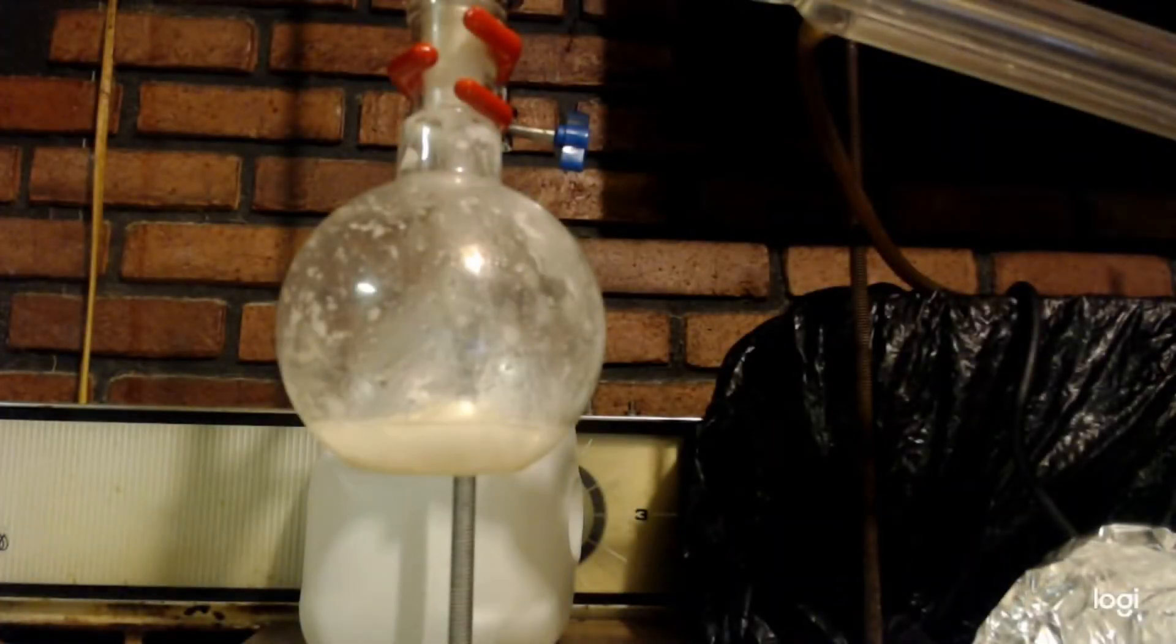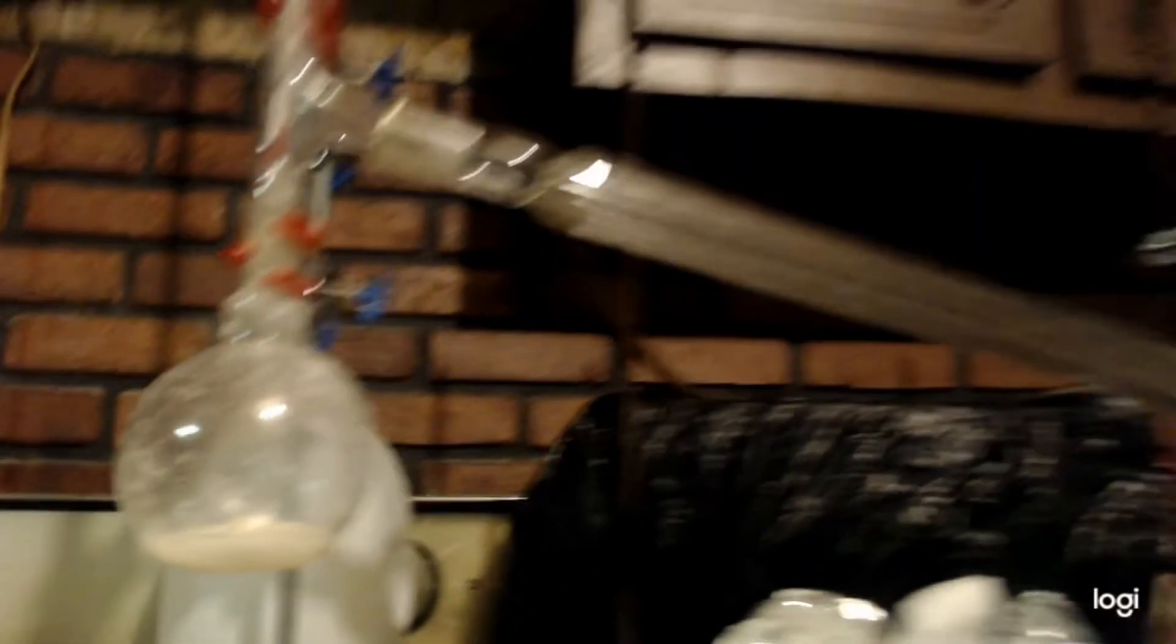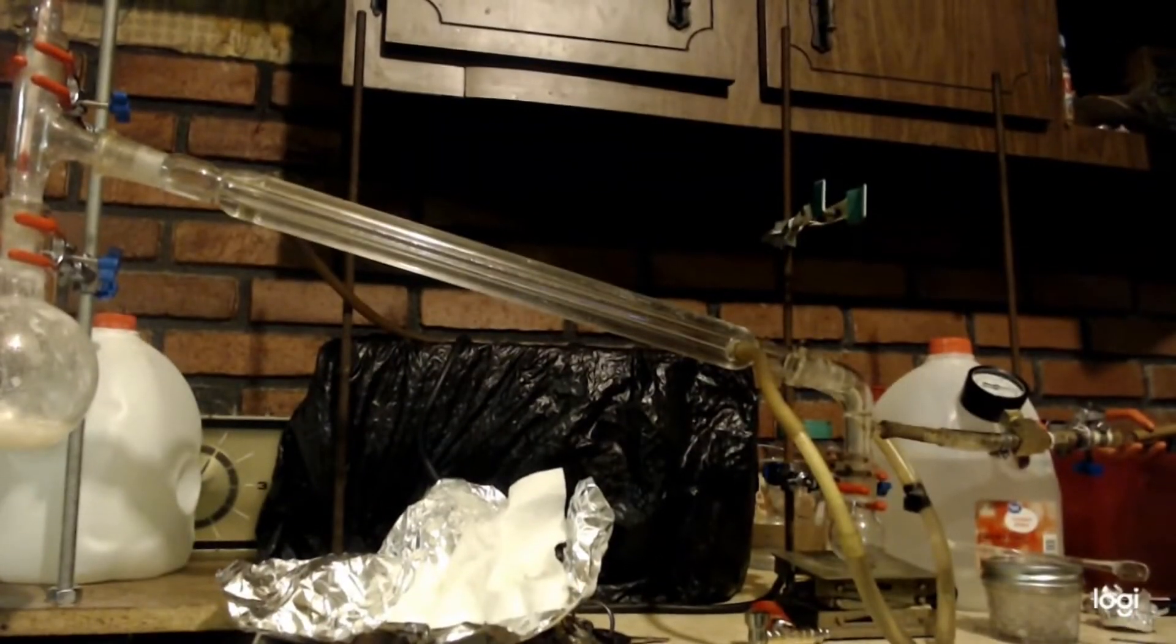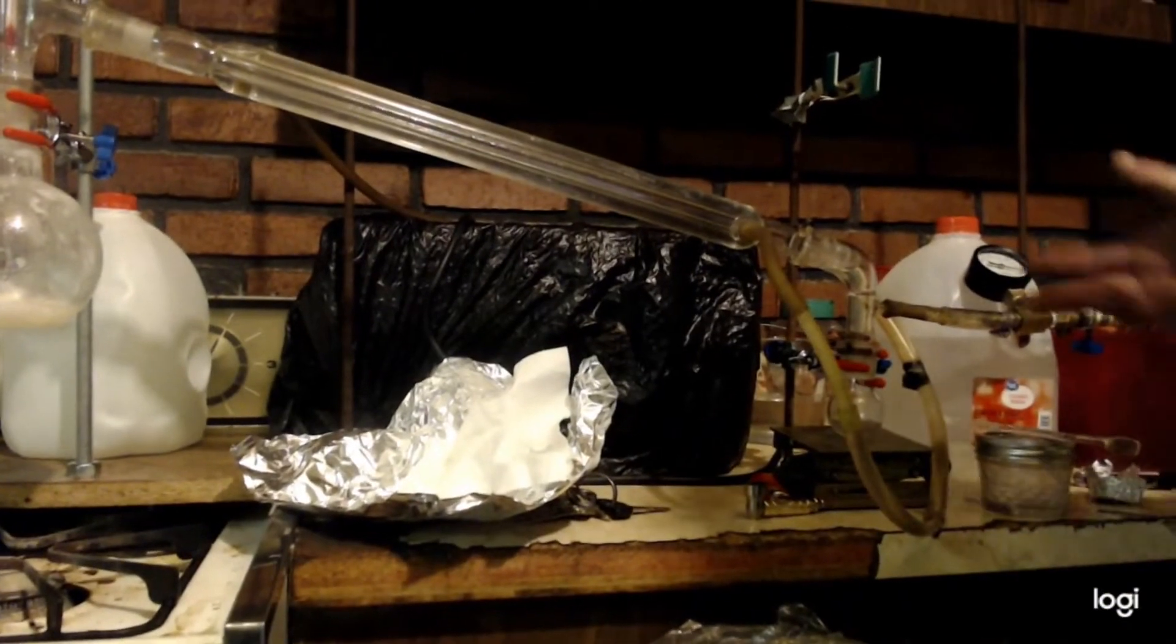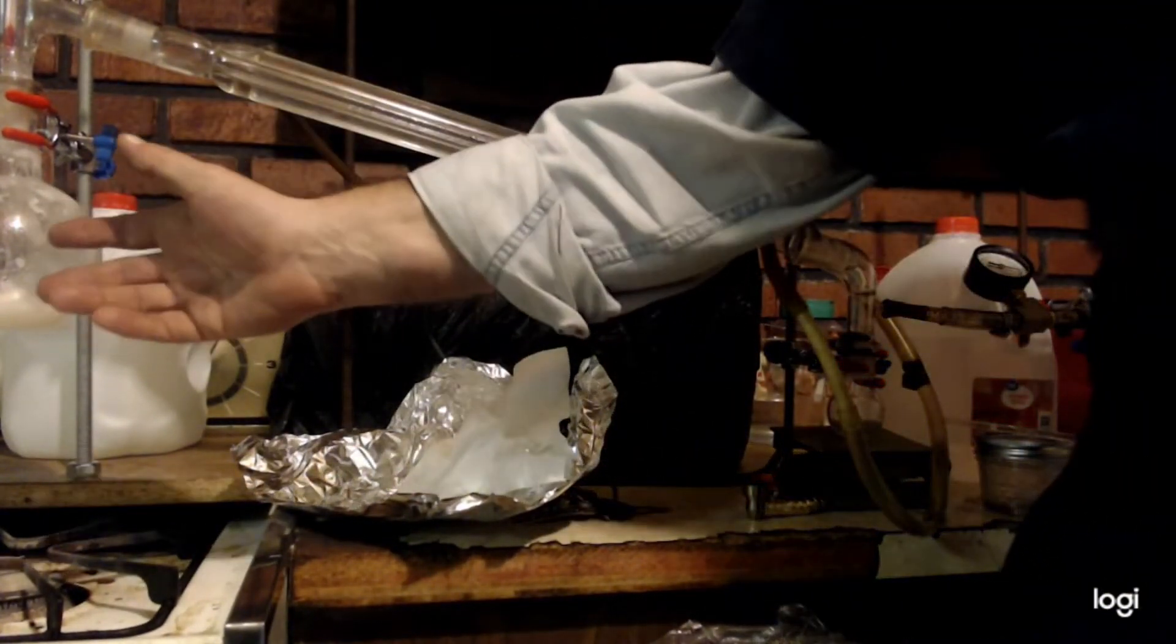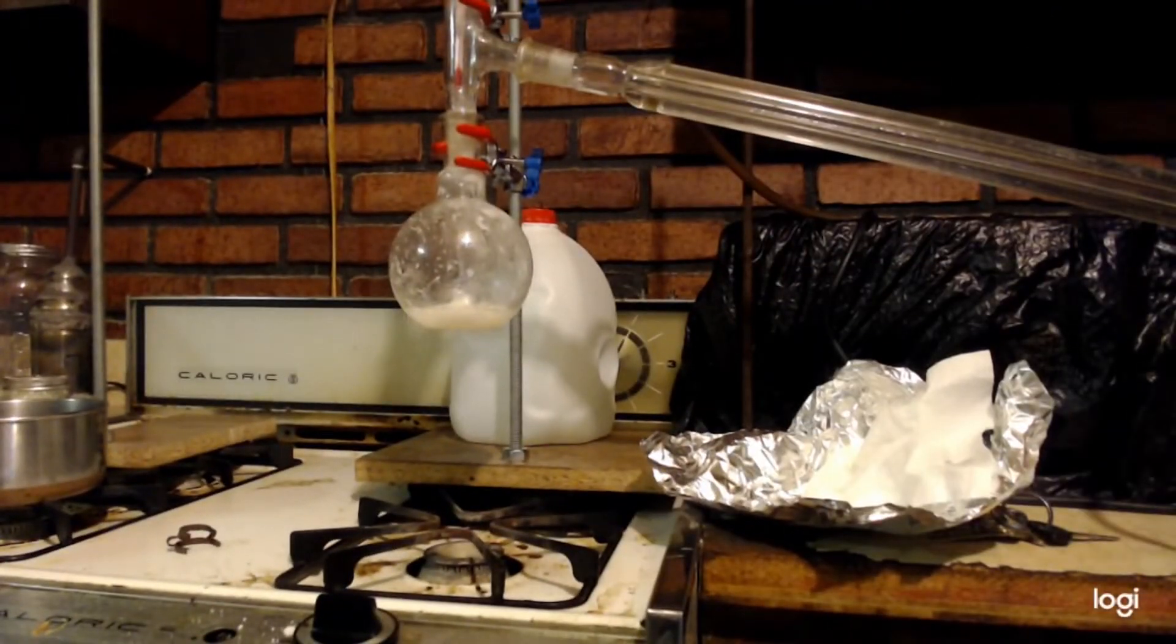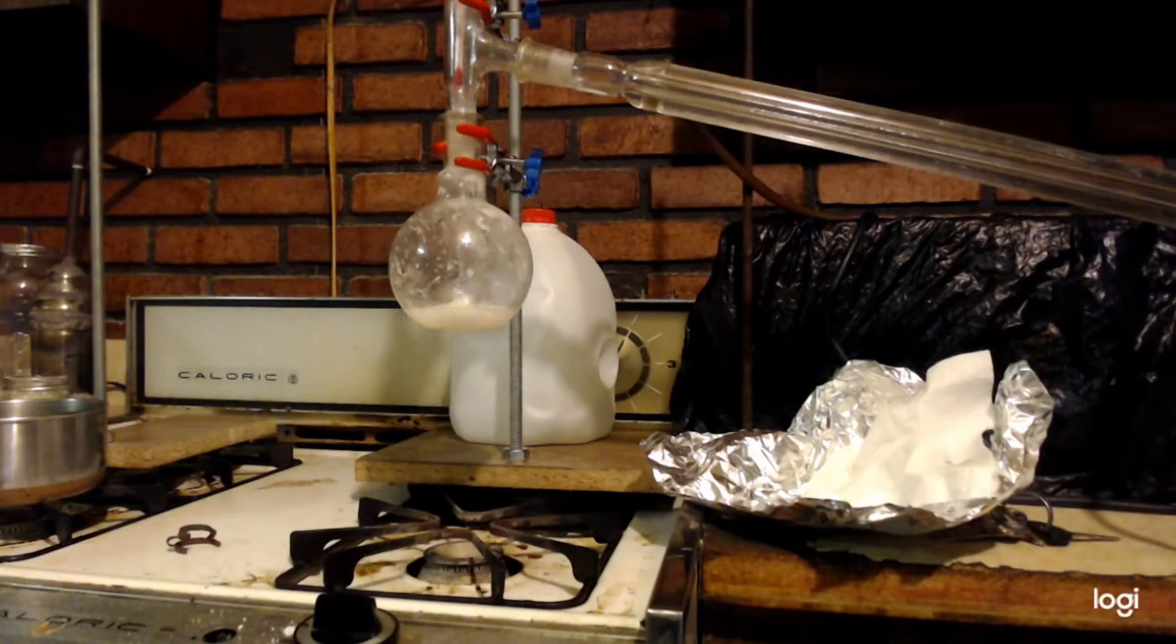Well, I got everything back into the flask and basically I'm set up again for distillation. I got the vacuum pump and I'm basically just going to put this on a hot water bath right over here. I'm going to put it on a vacuum and just let it dry, as dry as I can get it.